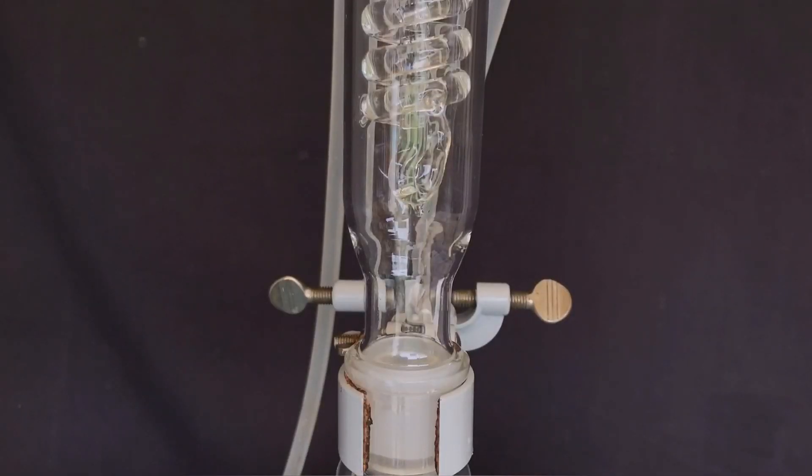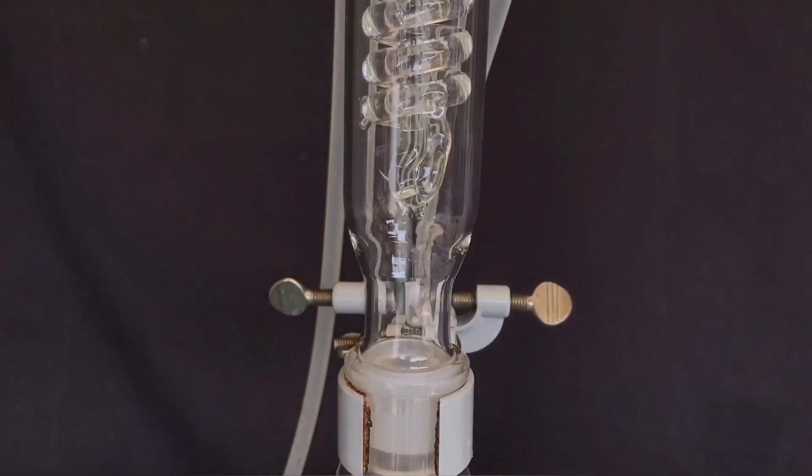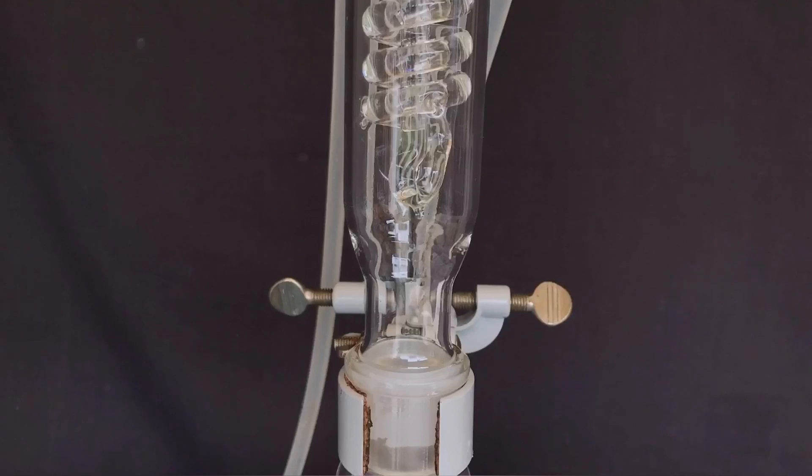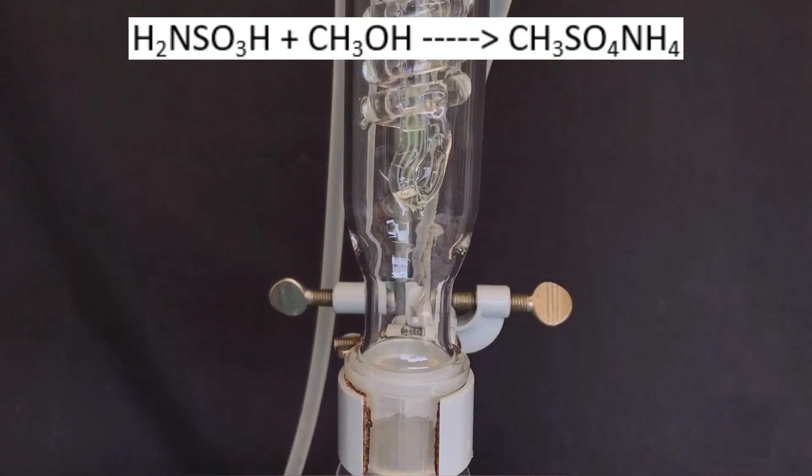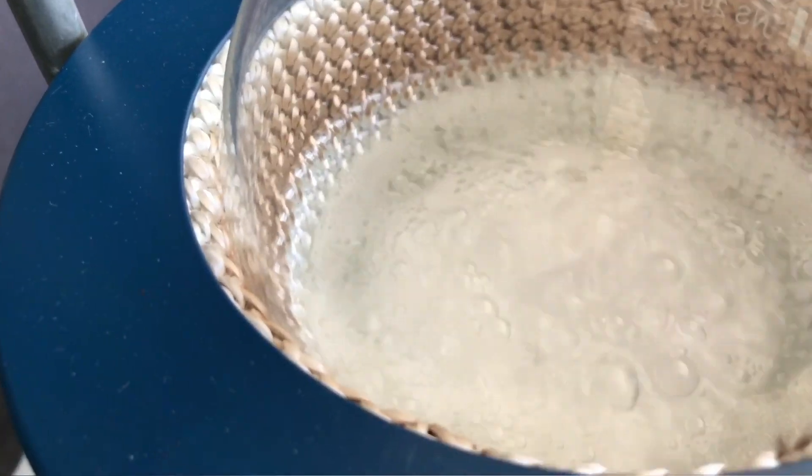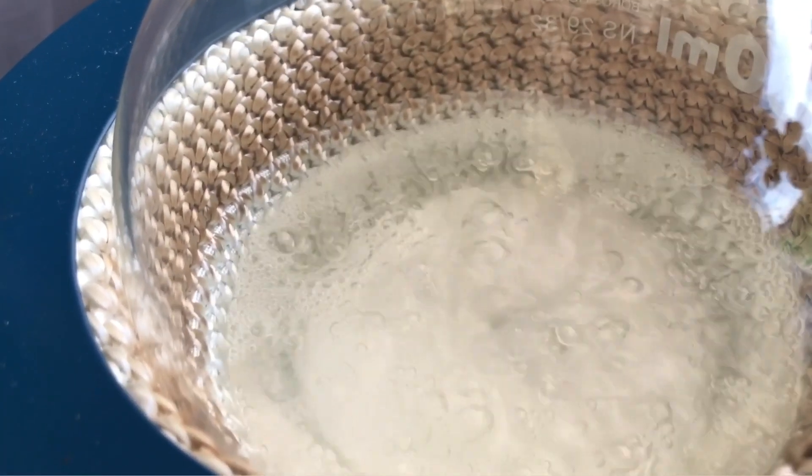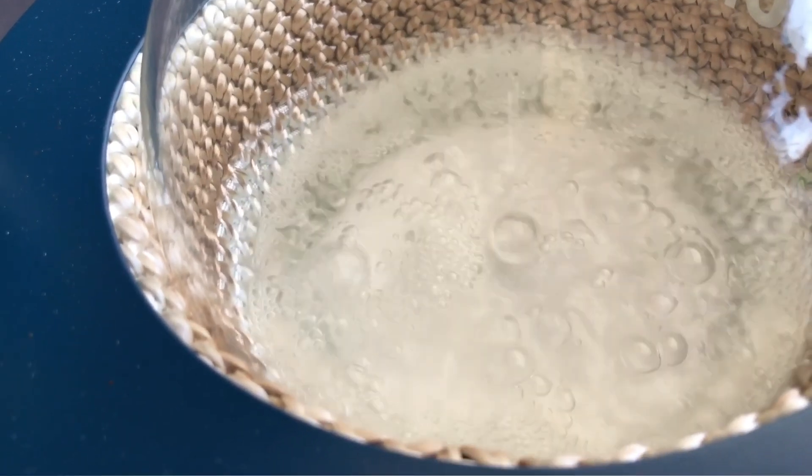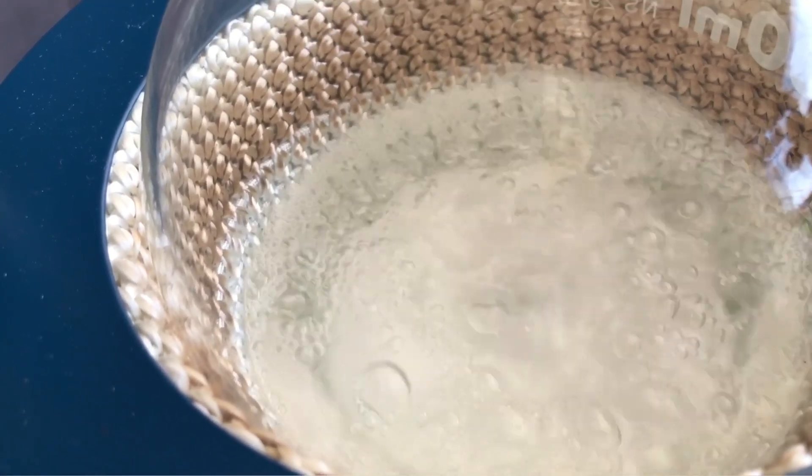Soon after turning on the heating mantle, we were able to see a beautiful vapor front of methanol climbing up the reflux condenser. The reaction taking place is the following: methanol reacts with sulfamic acid to form ammonium methyl sulfate directly.